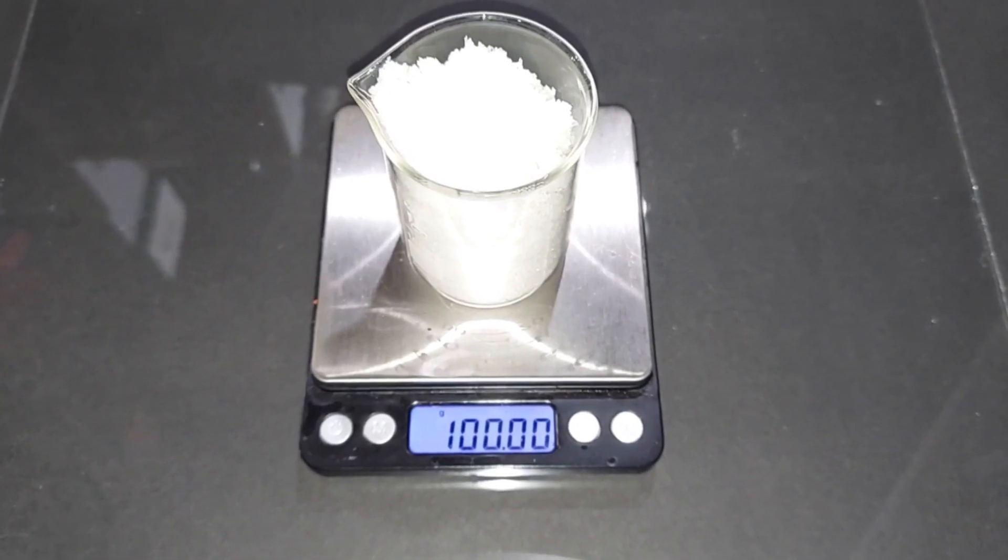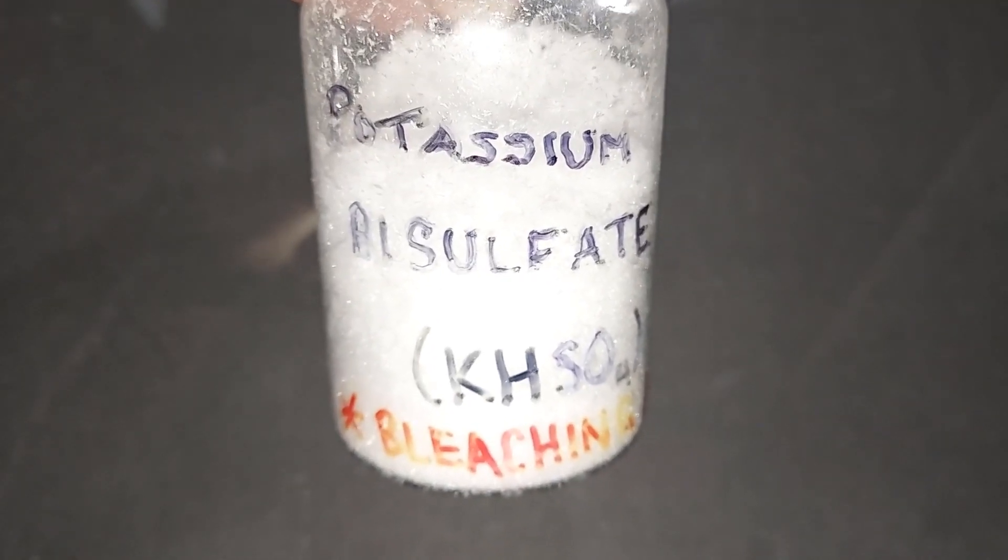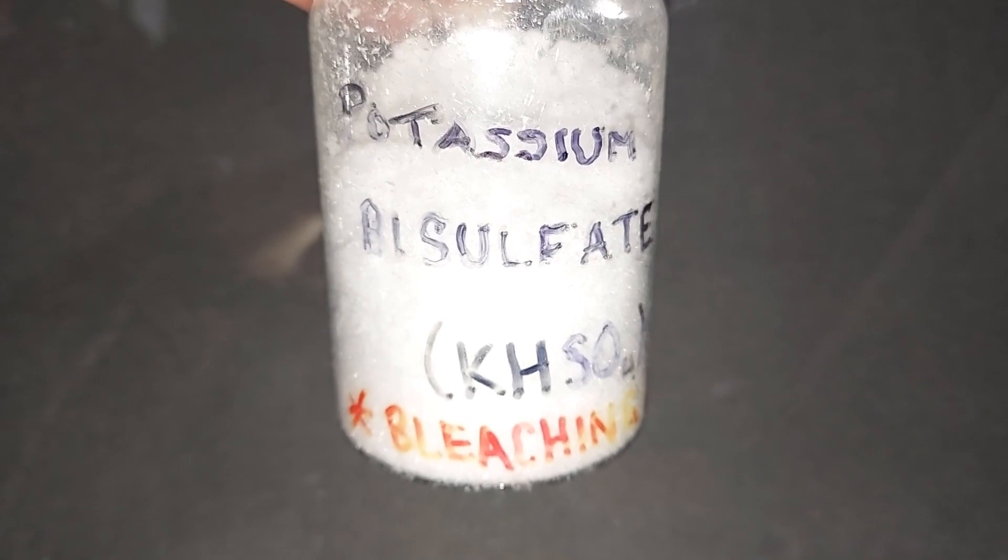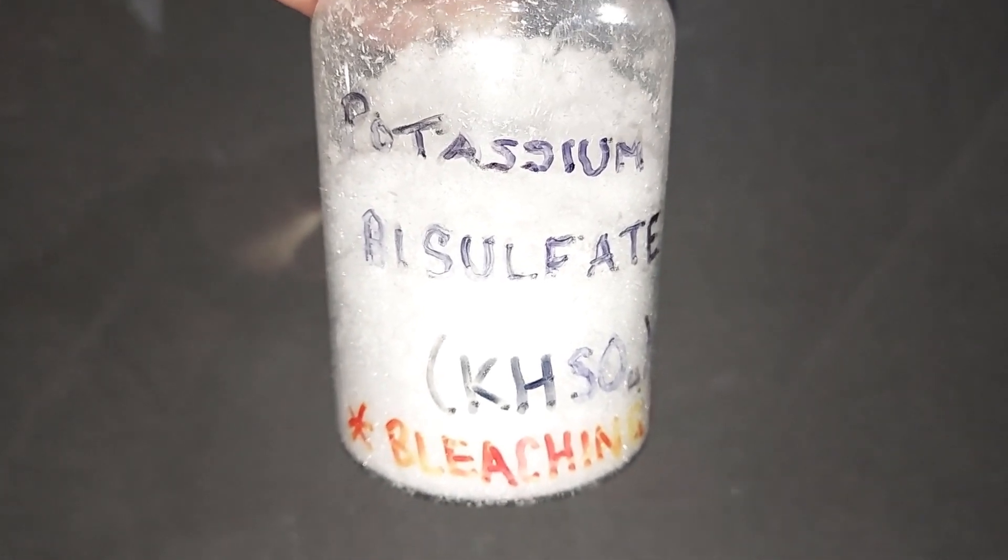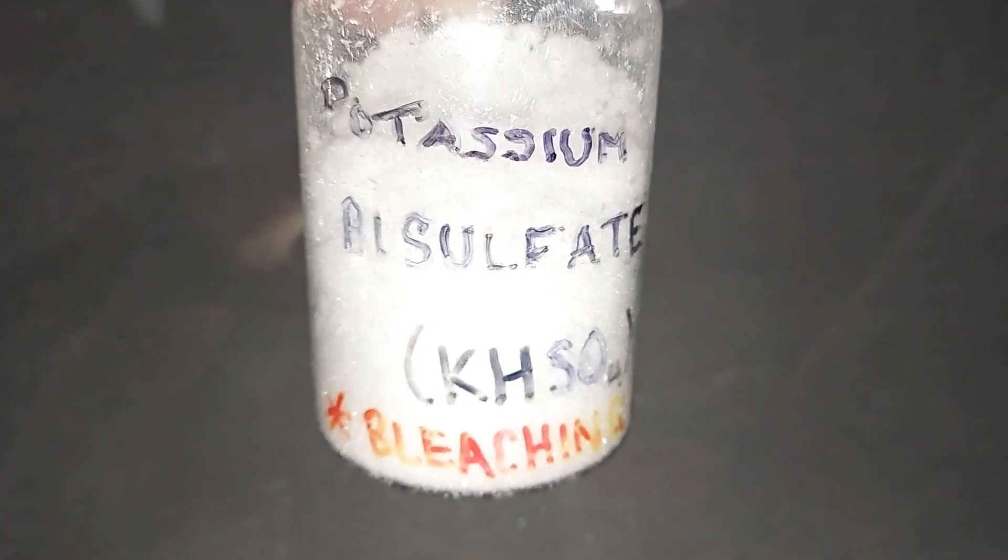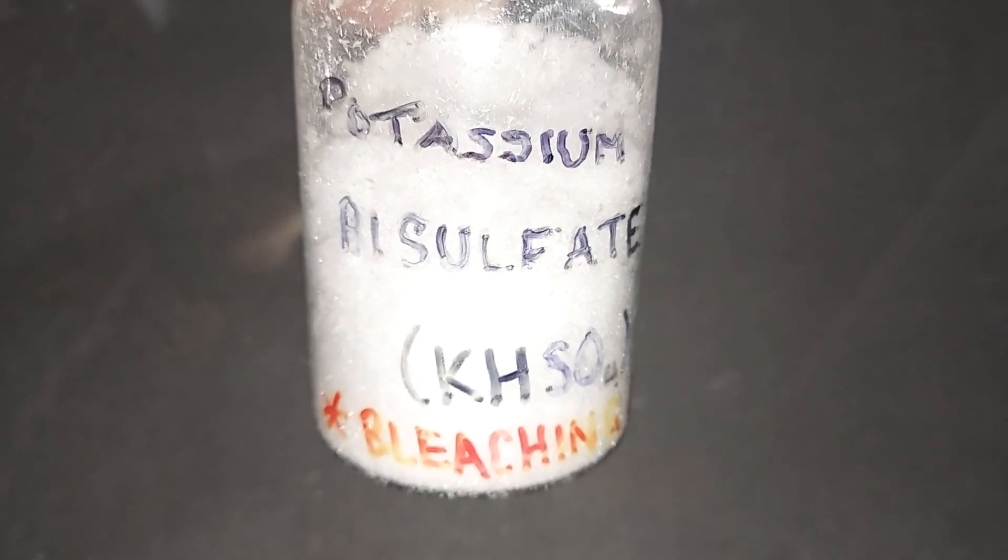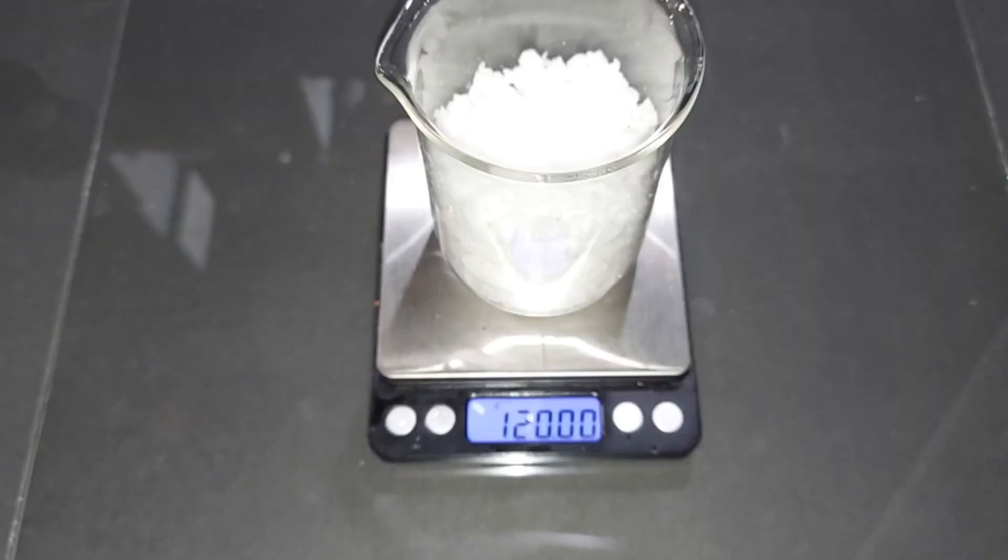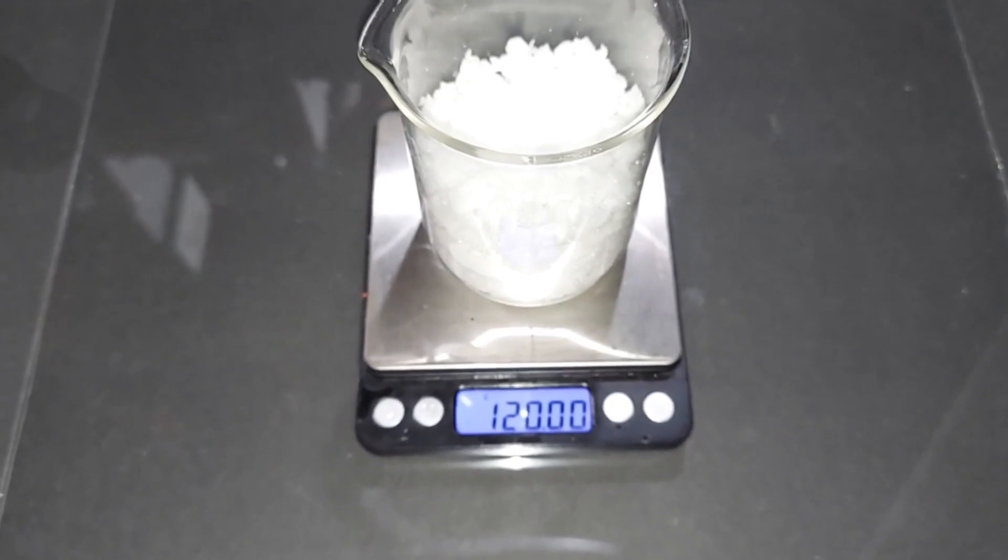100 grams of ammonium persulfate pre-weighed. This is the potassium bisulfate I'm going to be using. It came from making nitric acid around two years ago, and I saved it, of course. That's the reason you should save your chemicals, even if it's a leftover product. 120 grams of potassium bisulfate.